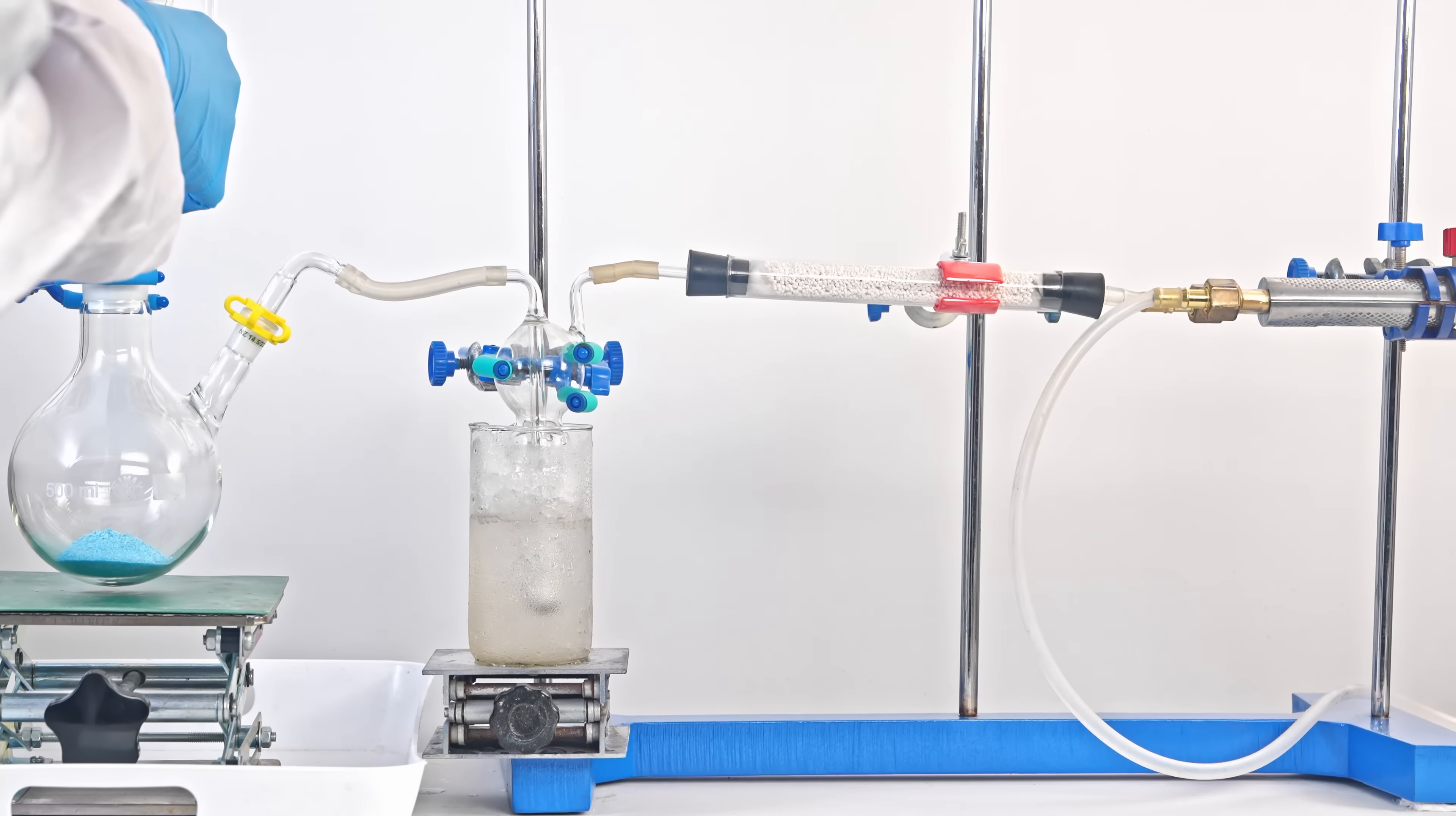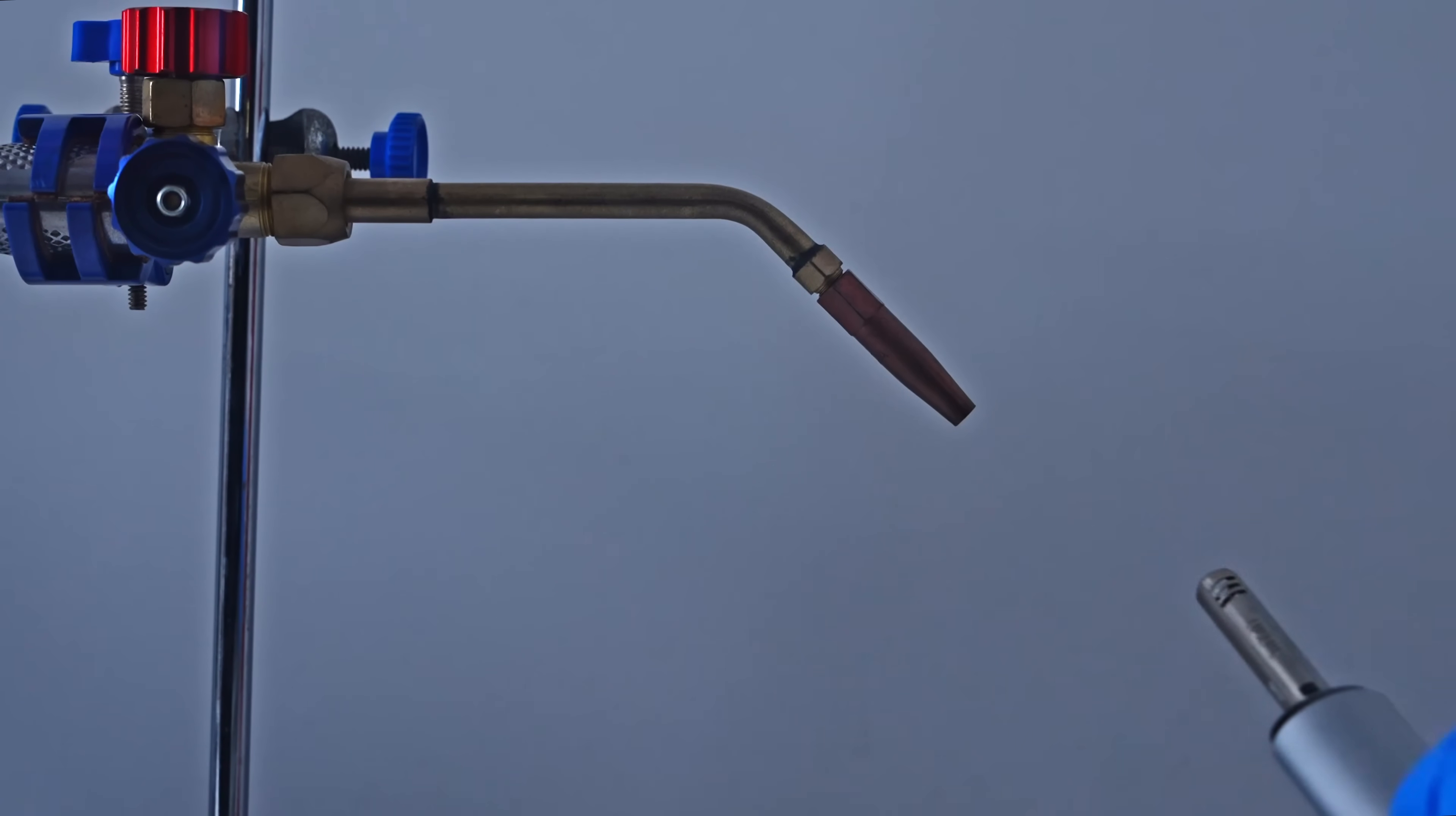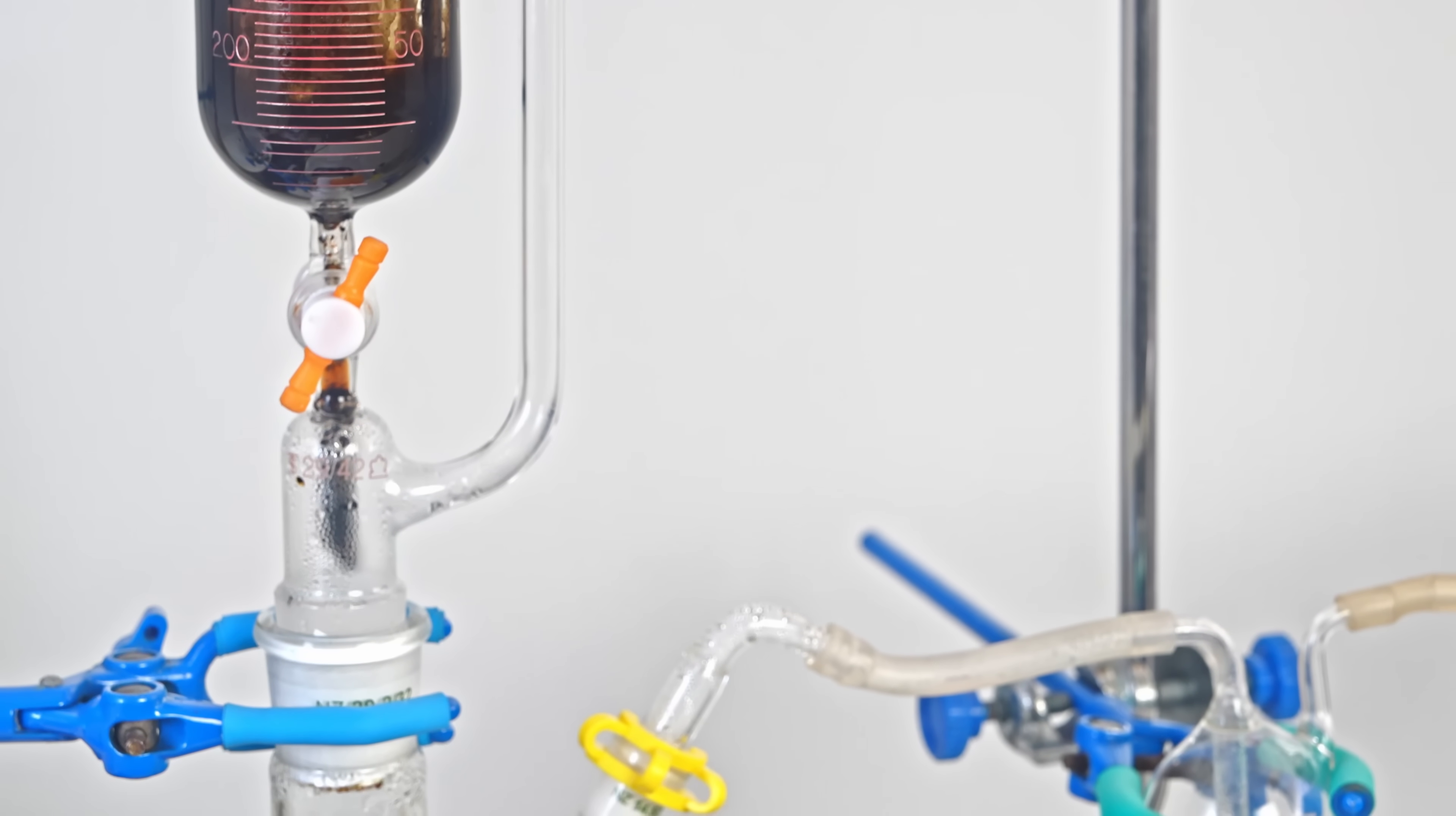So, I open the tap of the dropping funnel, and the potassium cyanide solution begins to interact with solid copper sulfate. This immediately produces gas bubbles. This is cyanogen being released. However, I was unable to ignite it. Most likely, with this method of synthesis, all the resulting cyanogen was polymerized before it reached the autogenous torch. Look, the entire dropping funnel is filled with polymerized cyanogen. It looks like this is a bad method of synthesis.